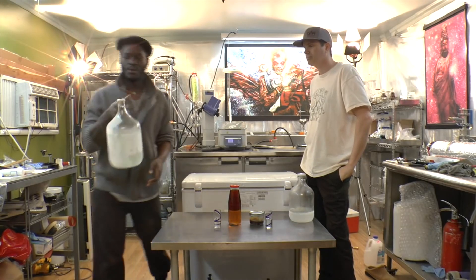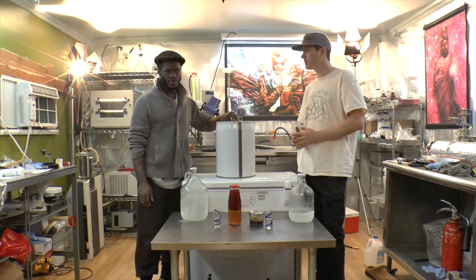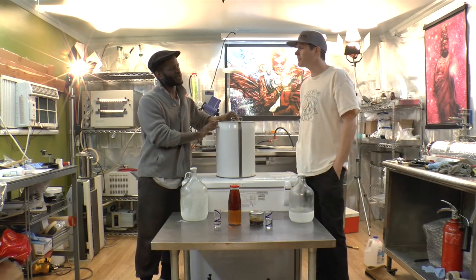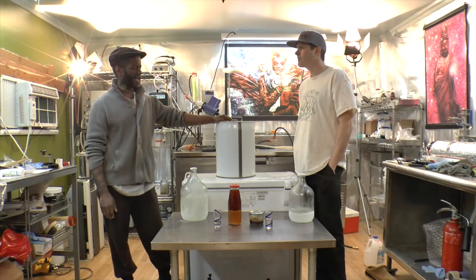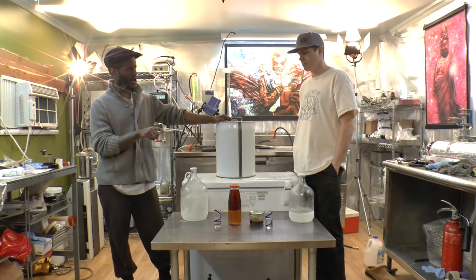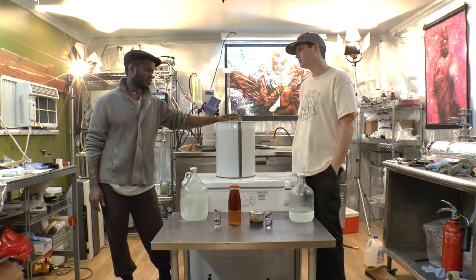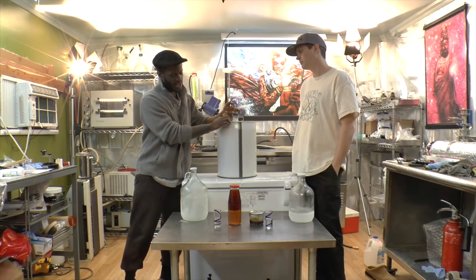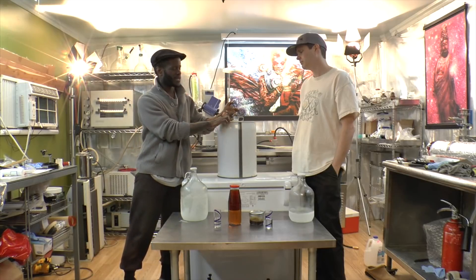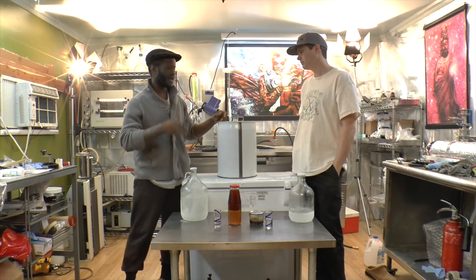This is a jug of limonene. I've found that over the course of purchasing limonene, they come in different cans and seem to come at different ages. Some come with an off-color yellow and are already beginning to show signs of what we're going to talk about. Every non-polar has its own oil. It's not about the gas, it's about the objects that surround it. At the end of the day, this will be my weak spot in my entire equation. The limonene will take this out, that's why I want it out of the can as soon as possible, or else I have more work to do.